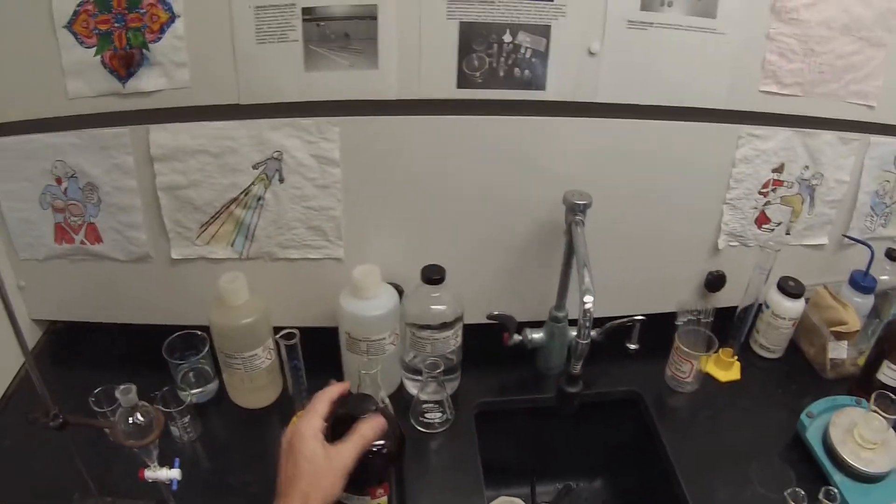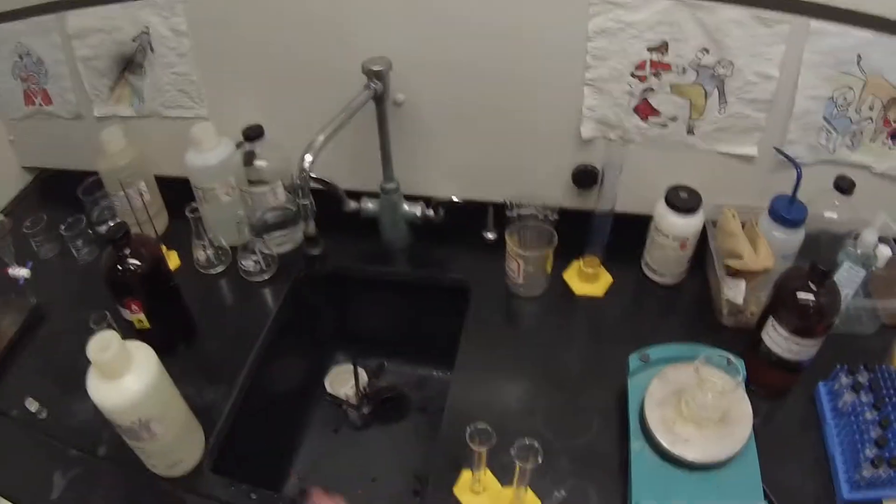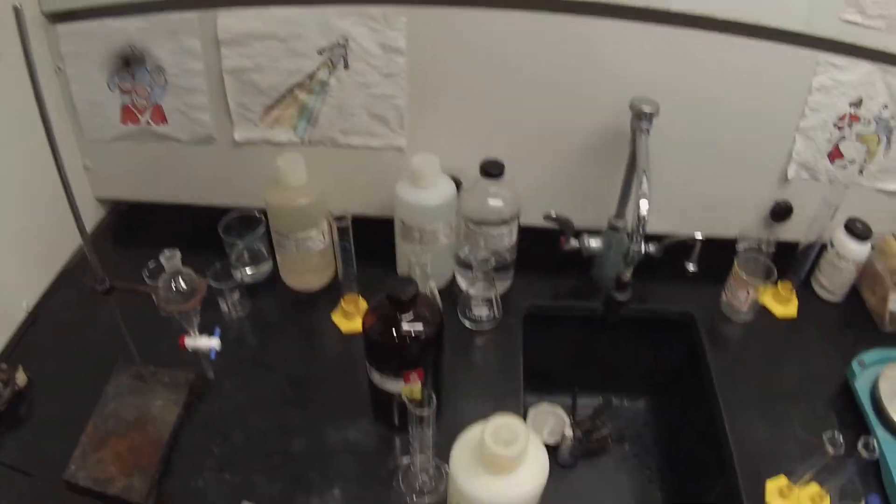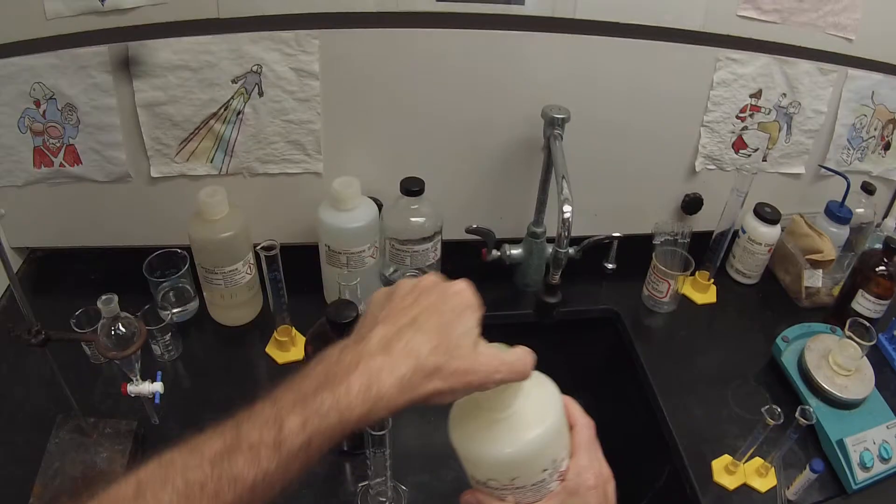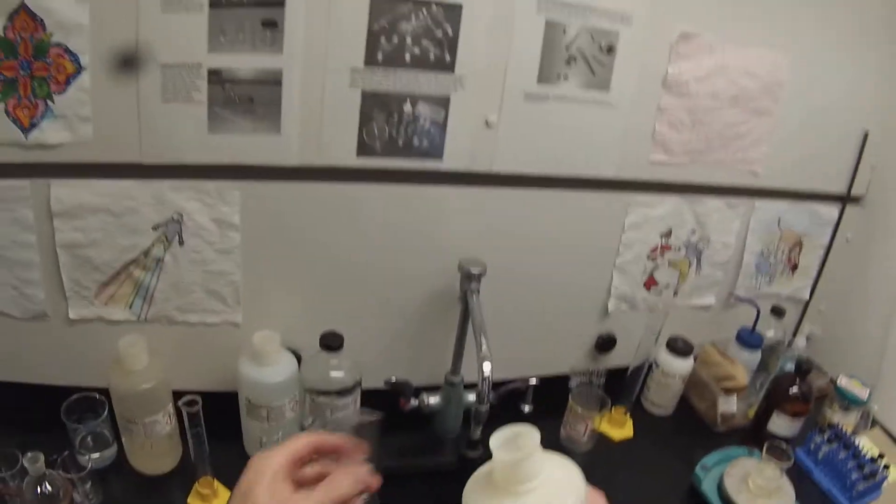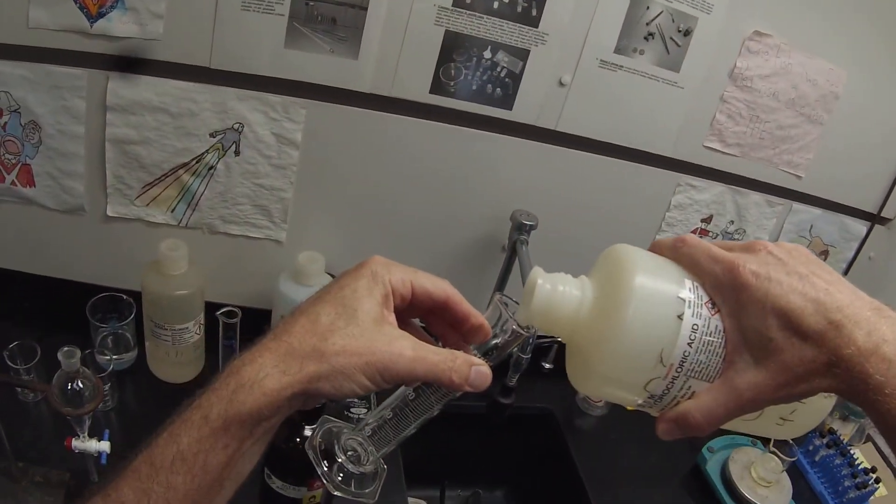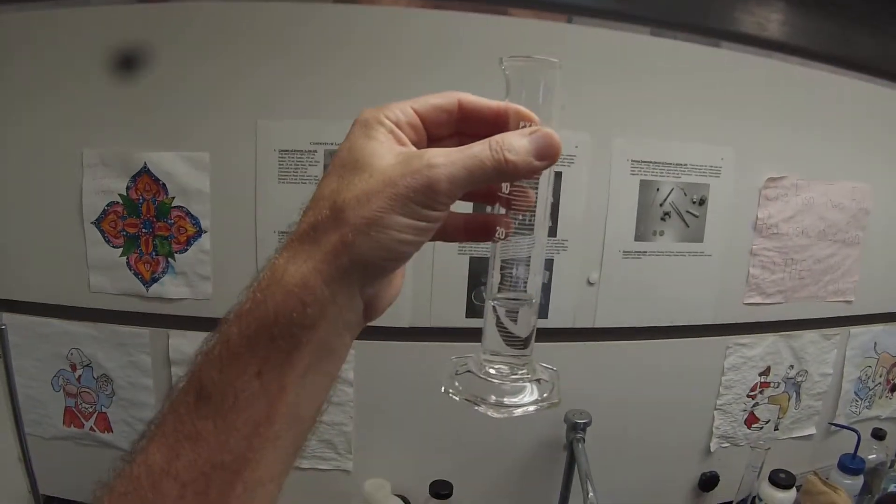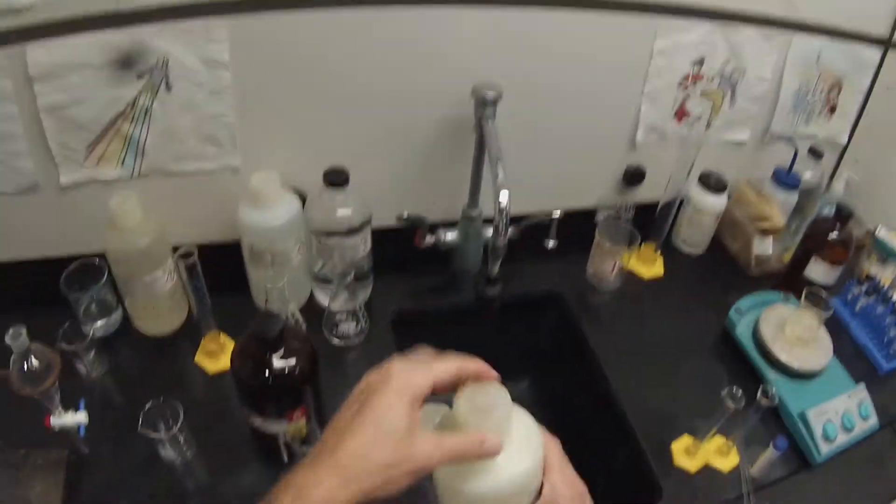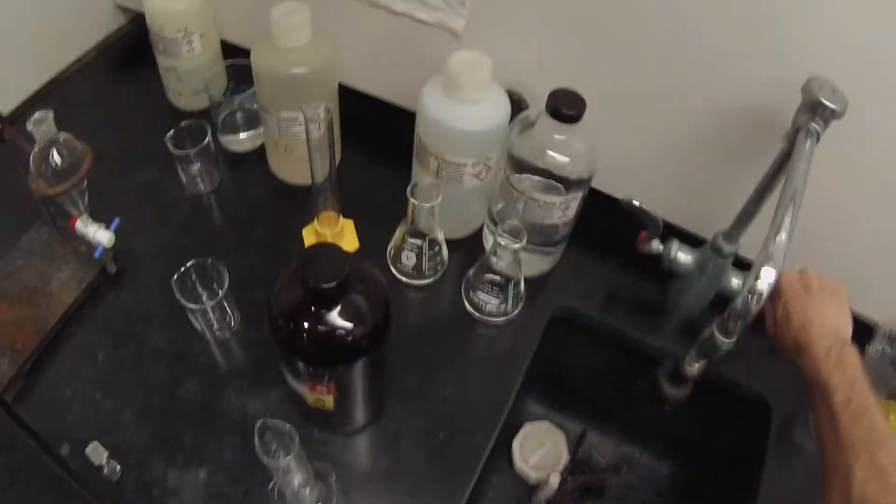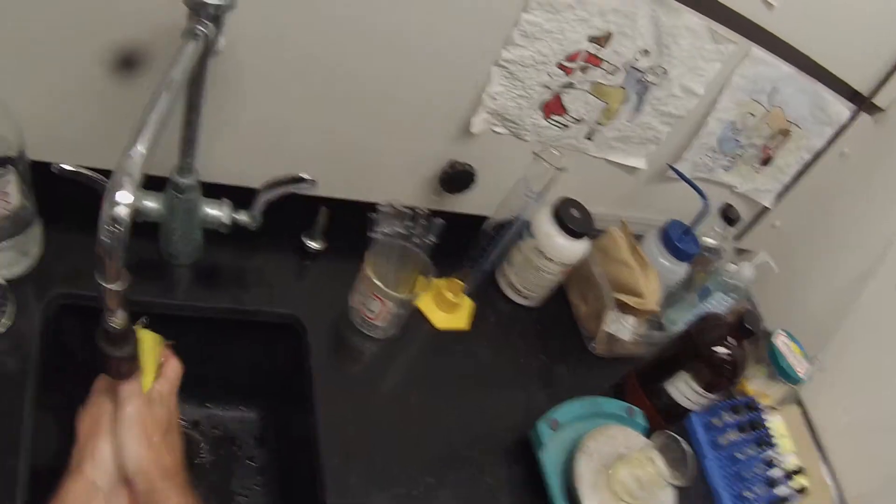Certainly 3 molar hydrochloric acid did a really nice job of extracting the tryptamine, but 3 molar should have been overkill. I'm going to do 2 15 milliliter extractions instead of 3 10 milliliter extractions just to simplify the process. I've got my beaker labeled A for acidic solution.